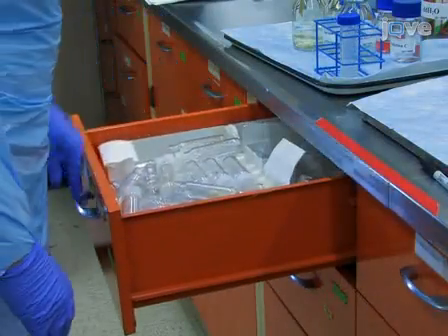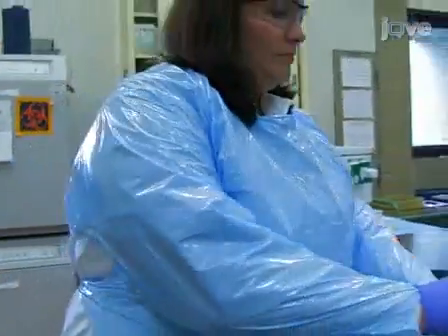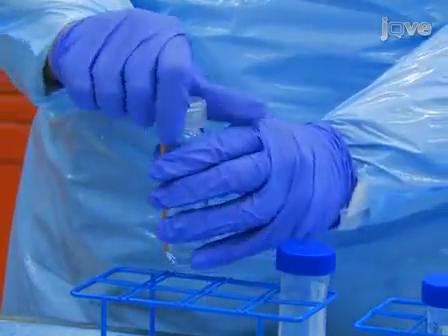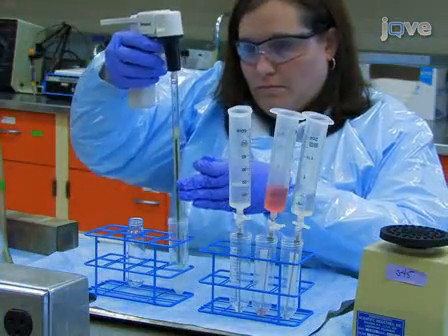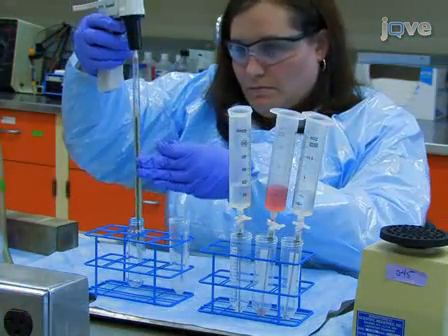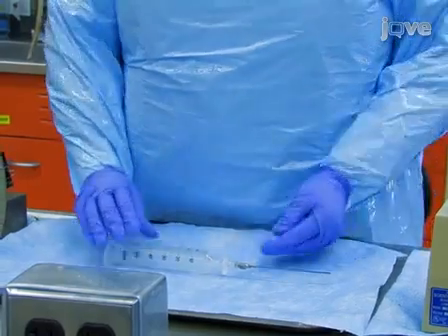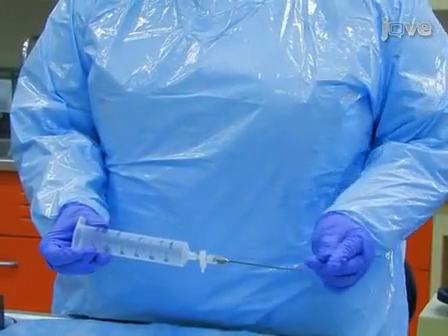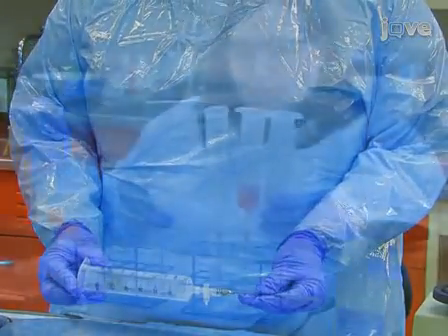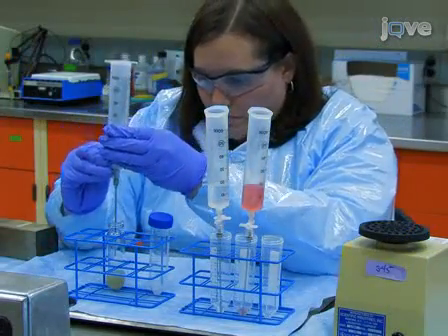We'll start by preparing a discontinuous cesium chloride gradient in a 50 ml polycarbonate Oak Ridge tube. To the polycarbonate tube, add 10 ml of the suspension containing TE and oocysts. Using a 50 ml syringe with an 18 gauge blunt-ended autoclavable steel needle and a two-way stopcock, slowly add the following solutions directly to the bottom of the tube.